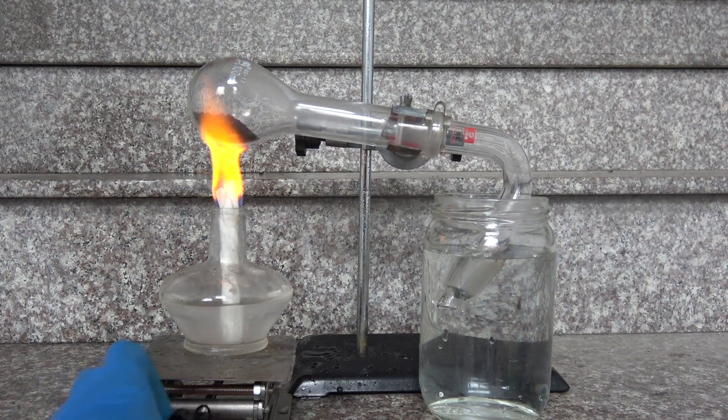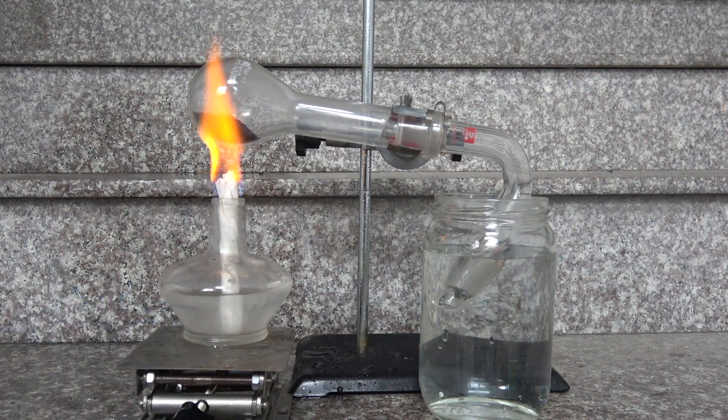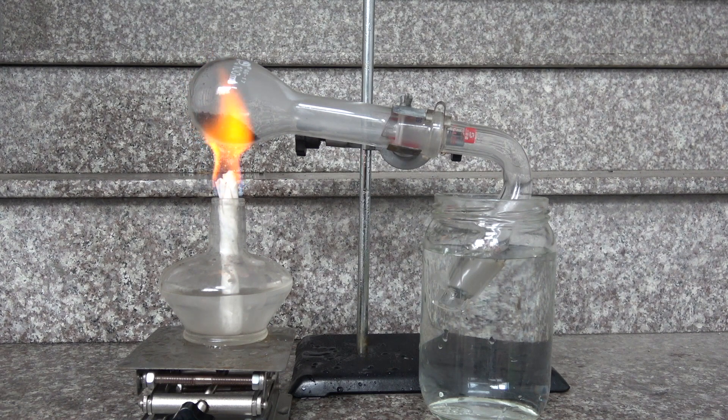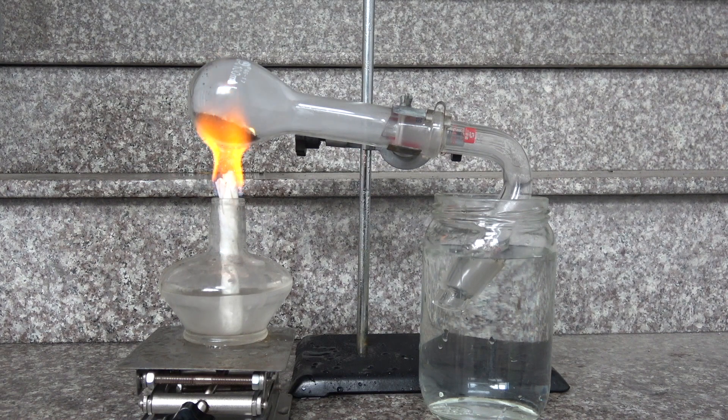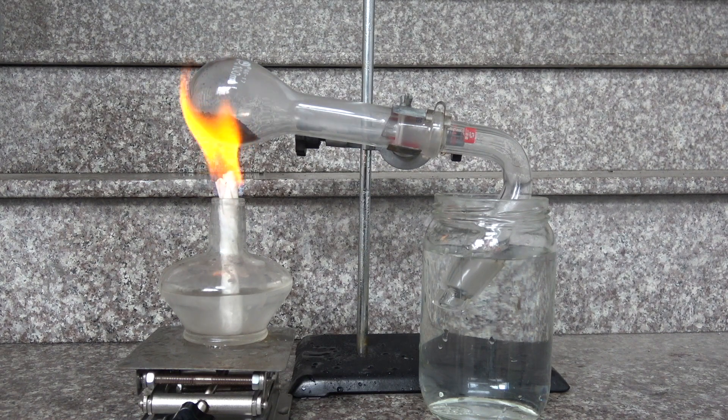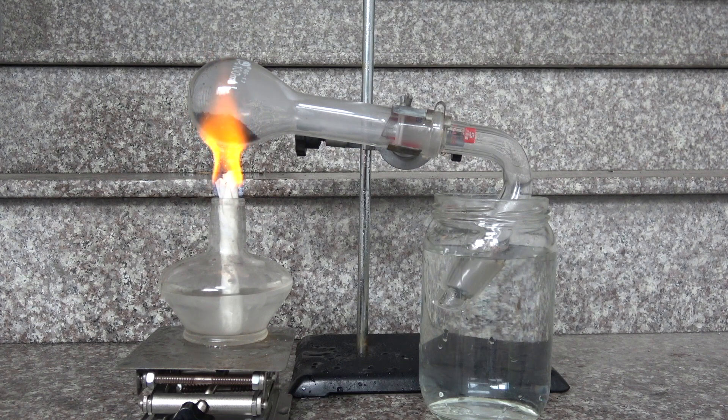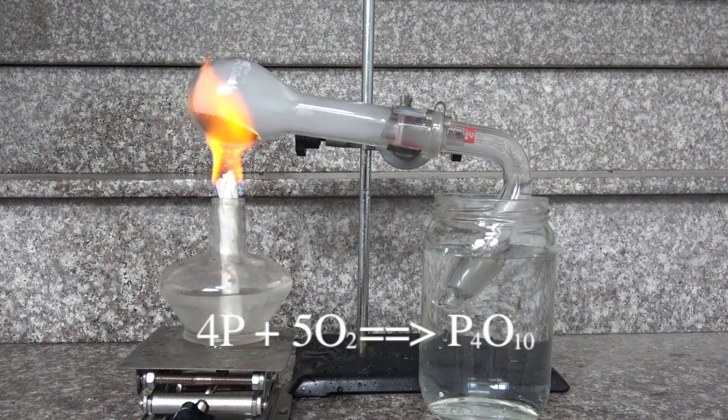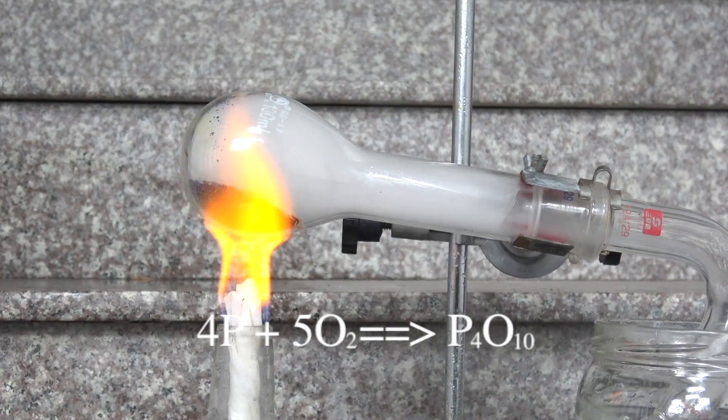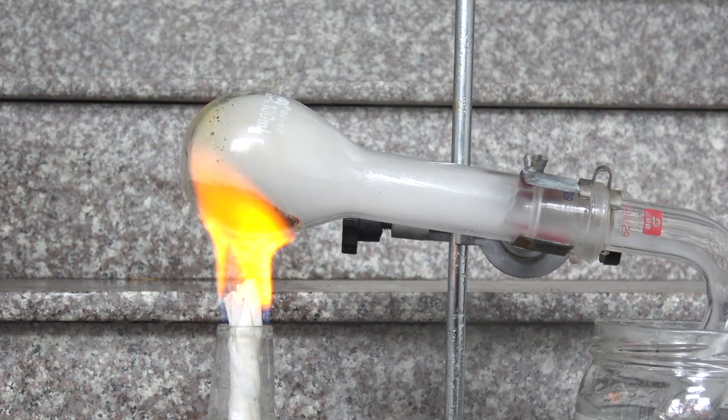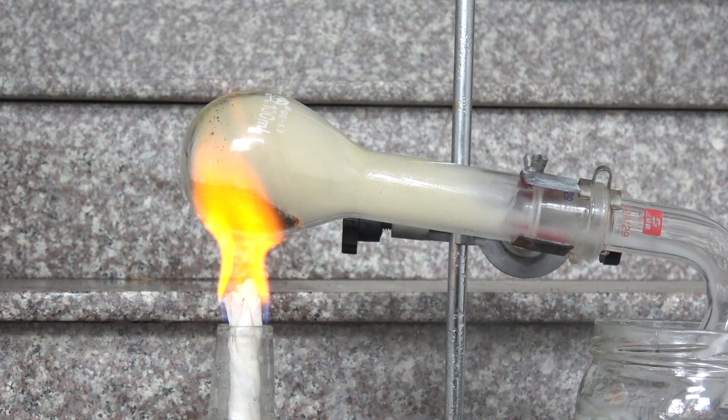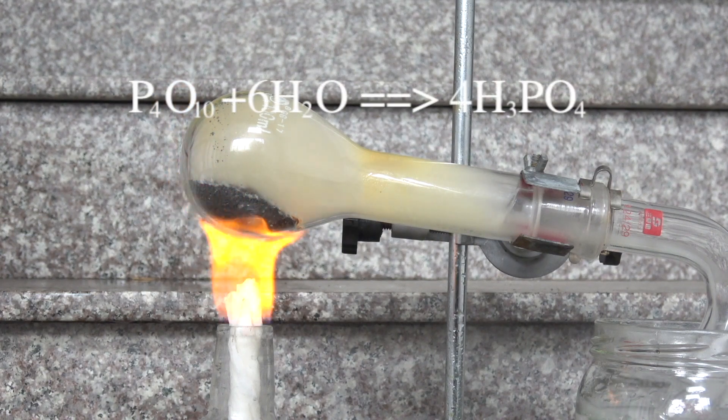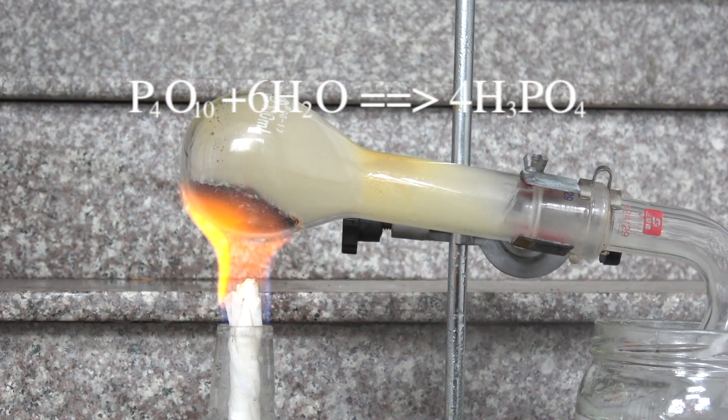It's also nice to have a lab jack, although it is not absolutely necessary. Having one around in this case would definitely help improving the fuel efficiency, as well as shortening the reaction time. However, there will be a lot of yield loss during the initial stage as a small portion of phosphorus will react with oxygen in the flask to form phosphorus pentoxide, which is the white smoke in the flask. As heating continues, the phosphorus pentoxide smoke will gradually fade out thanks to its hygroscopic property and its reaction with water. Thus, it will not add as impurity to the final product.